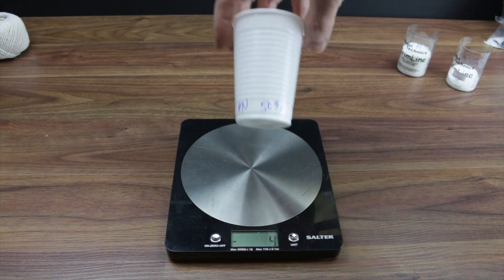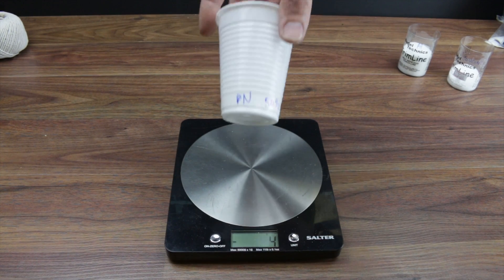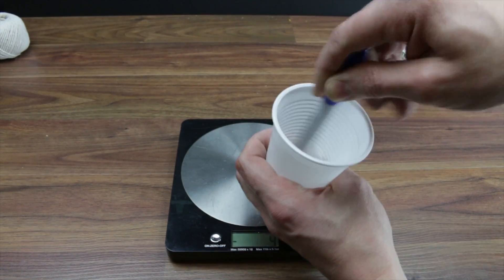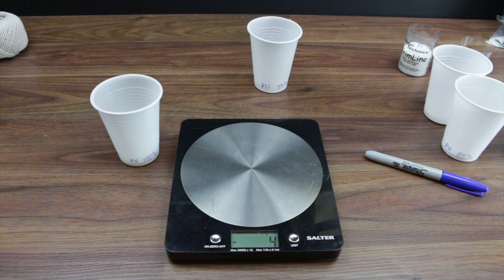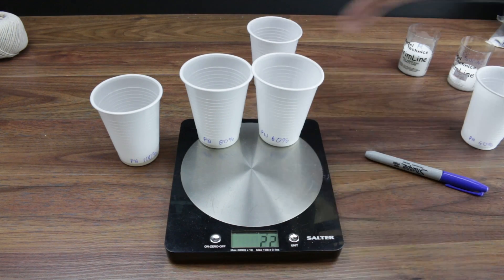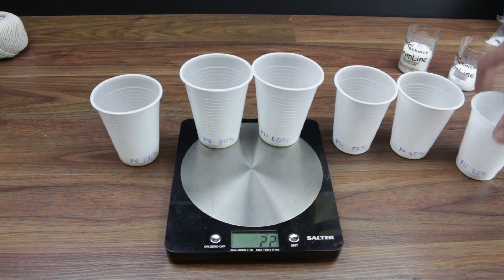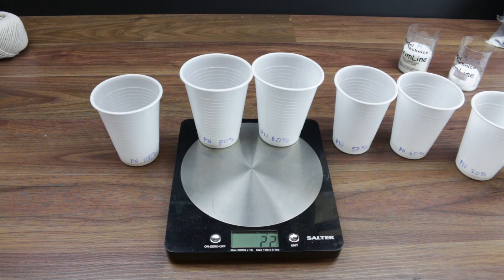We've got a 50/50 mix and I've labeled that PN to stand for potassium nitrate. We'll mix that up a little bit, make sure it's all properly mixed. Got all these ones mixed up: we've got 100% potassium nitrate, 80%, 60%, the 50/50 we just did, 40% potassium nitrate and 60% sugar, 20% potassium nitrate, and zero percent - so this is just pure sugar. We're going to burn each one individually and see which one is the best mix.